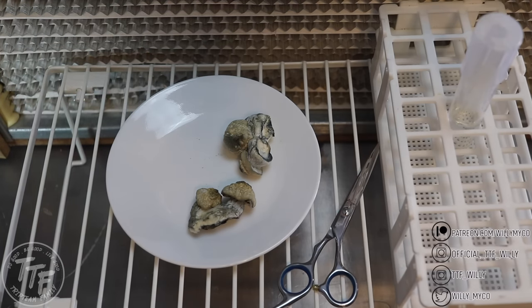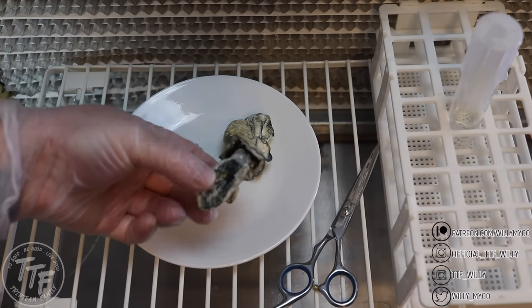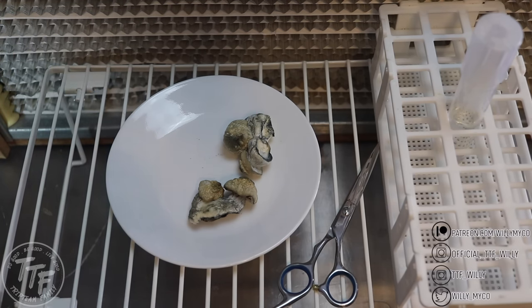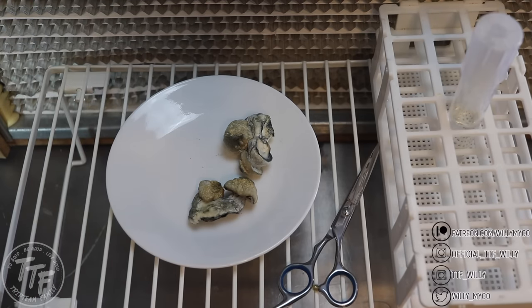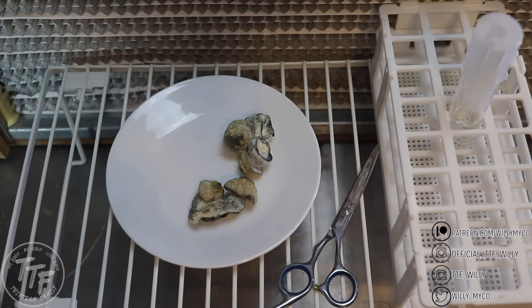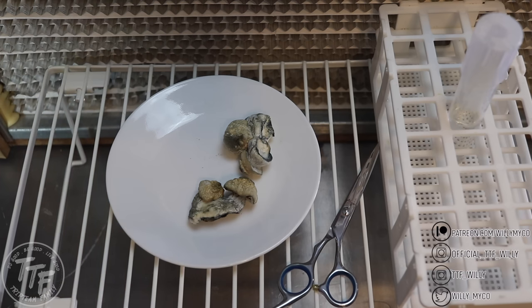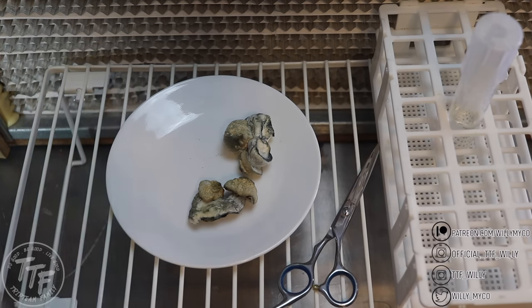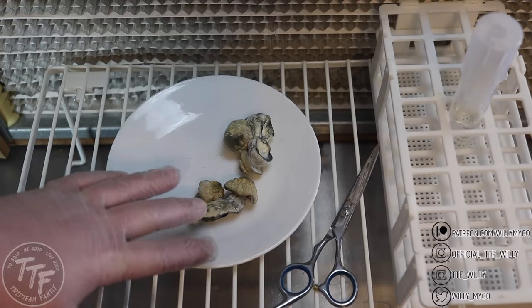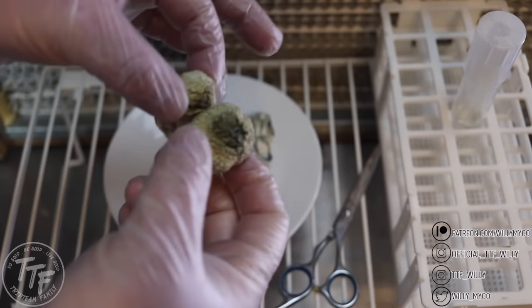If they were dehydrated using really low heat, you'll also have a high success rate. If dehydrated using really high temperatures — over 150°F for a long period — it'll be a lot more difficult for the mycelium to come back. If it's a spore-producing mushroom, you could just swab the gills. But since these mushrooms don't drop spores, we're going to try to reanimate the mycelium — essentially taking a tissue sample. Before putting it to agar, there are a couple things we need to do.